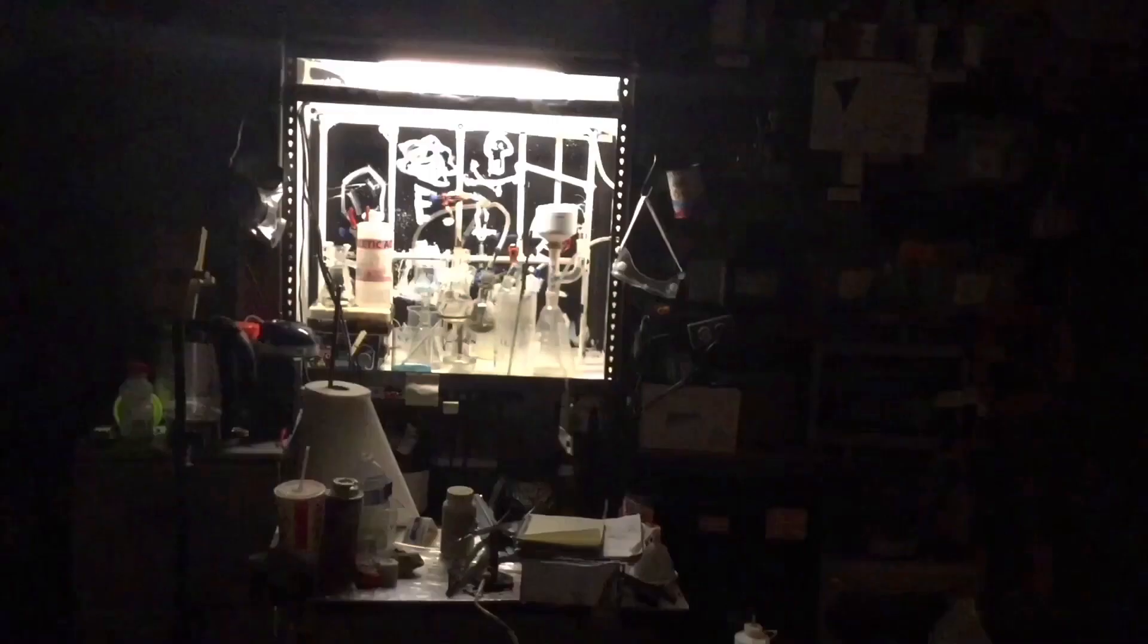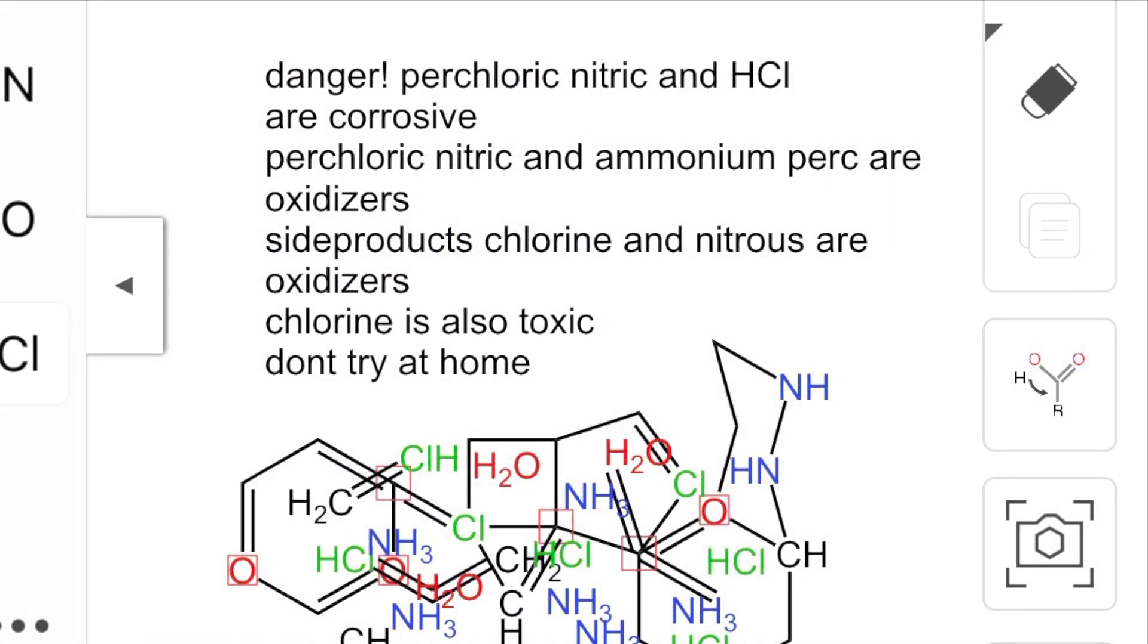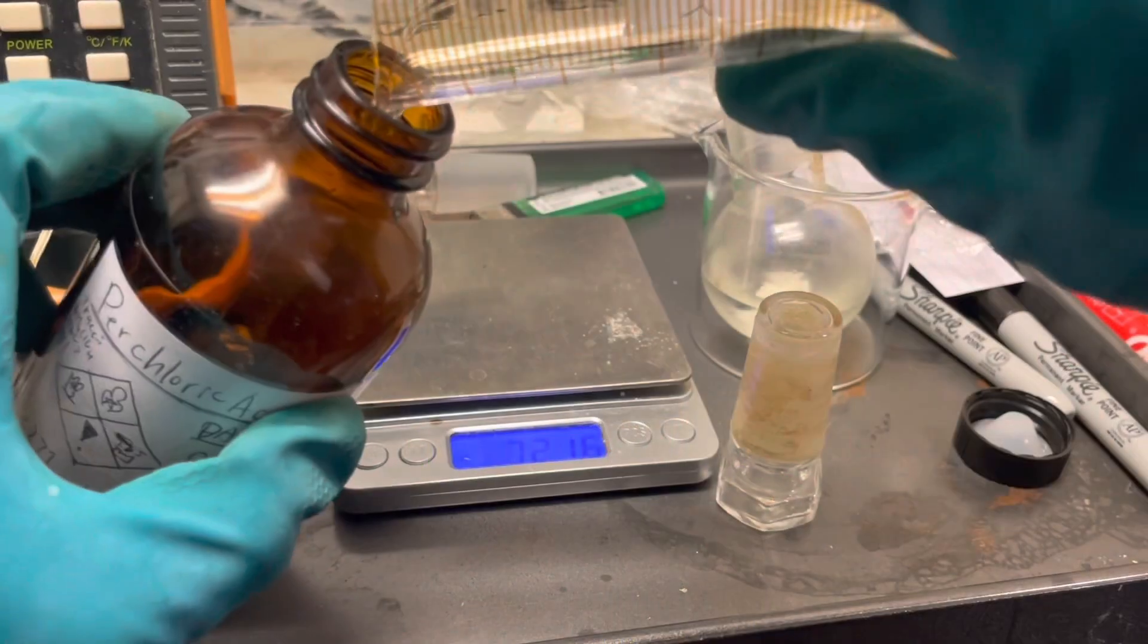It's all so good. It's a lot of dark white. Warning: nitric acid, perchloric acid are corrosive and oxidizing, the latter being crazily so. Ammonium perchlorate is oxidizing, hydrochloric acid is corrosive, the side product chlorine is toxic, and nitrous is oxidizing. Do not try at home. Welcome back matter manipulator.